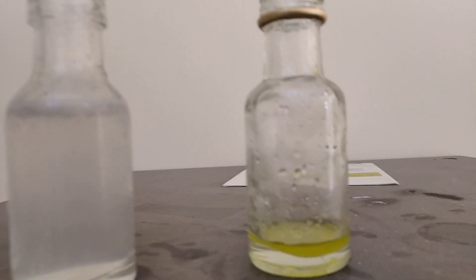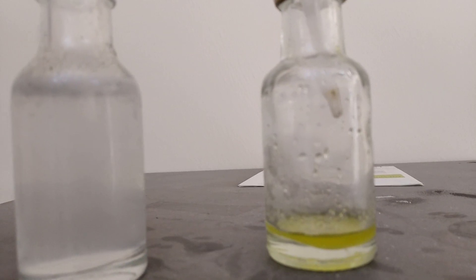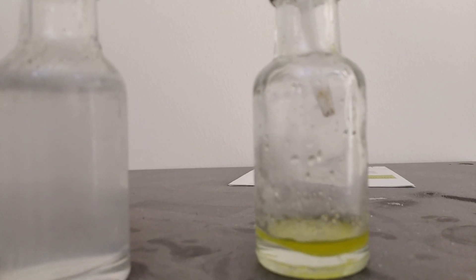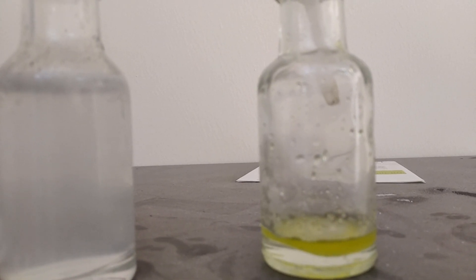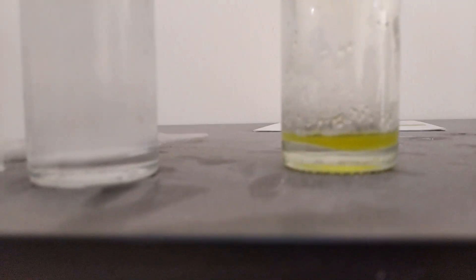The run is finished and we're doing some qualitative testing. Here's a bit of the solution. First, we test for excess chlorate by dropping it into a sulfuric acid and salt mixture — a highly sensitive test. No bubbling has occurred, which means we're all good. Now this is potassium chloride — we just stick it through. That instant precipitation confirms it. The two tests confirm: one, we don't have any chlorate left in the mixture, or at least very, very little; and two, we have perchlorate.